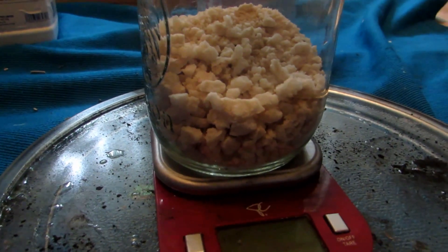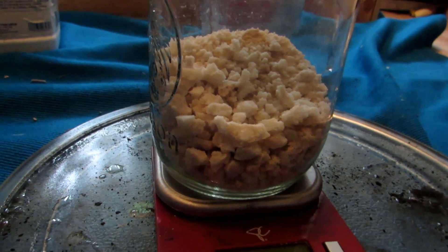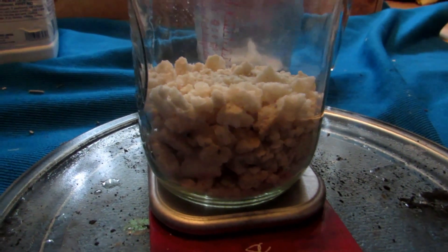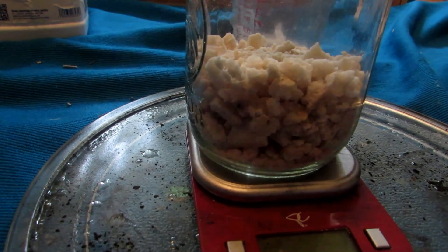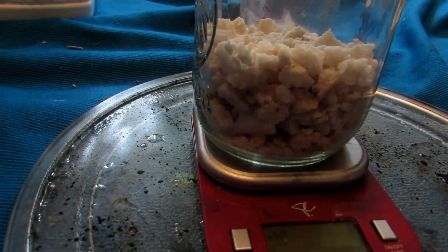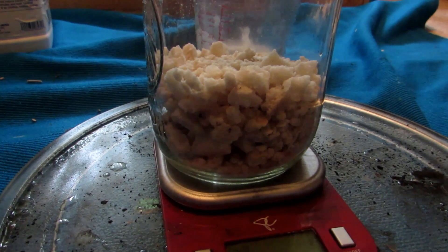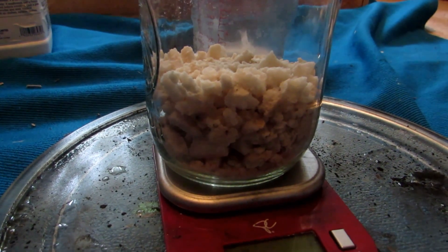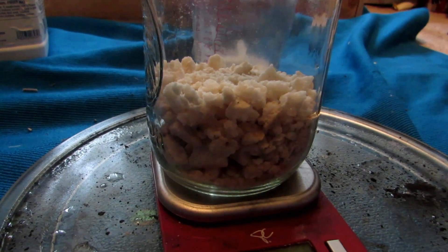Because I was concerned about remaining water, I crushed up the product from the baking tray and put it in the oven at 170 degrees Celsius for an hour. Even at that temperature, some sodium nitrate started decomposing — over the course of an hour it took on a brownish color. This is because small amounts of nitrogen dioxide gas were produced, and nitrogen dioxide is a brown gas. If drying in an oven, I would keep it below 100 degrees Celsius, or 120 degrees maximum.